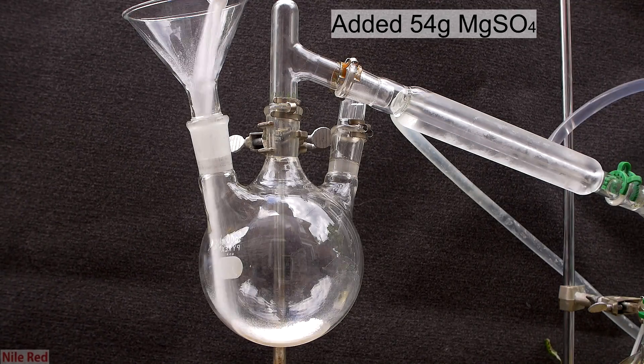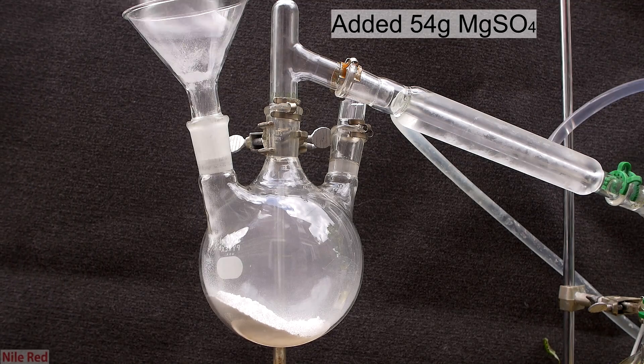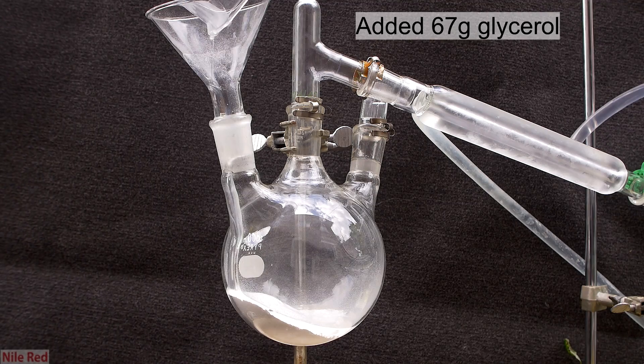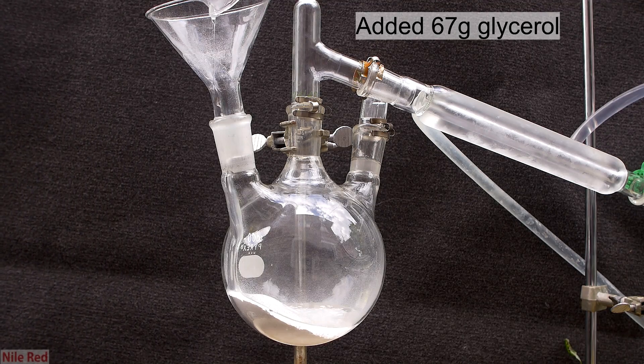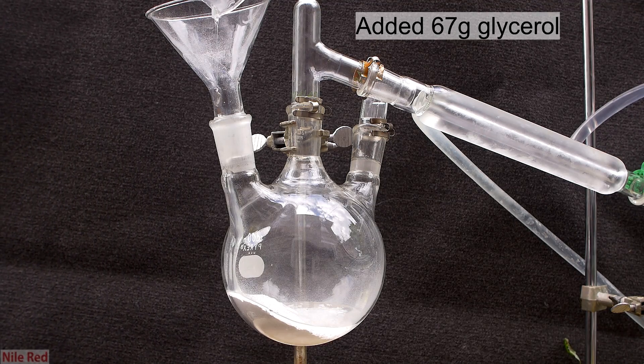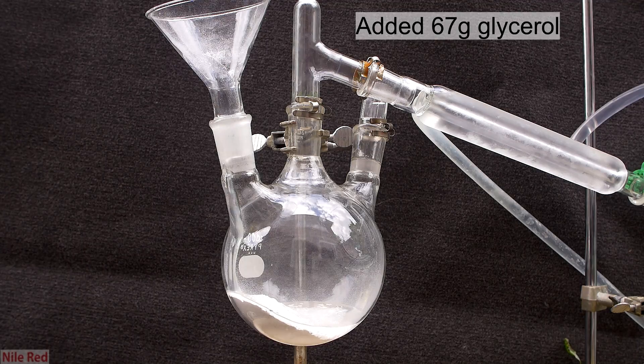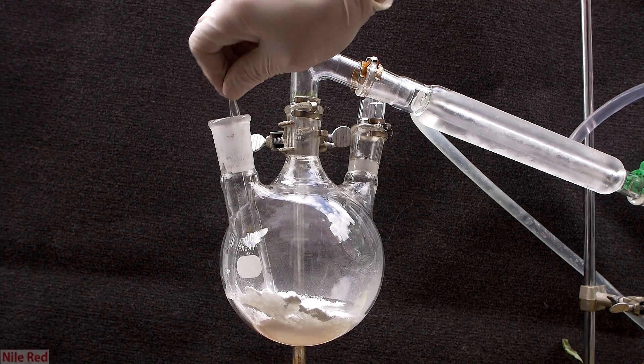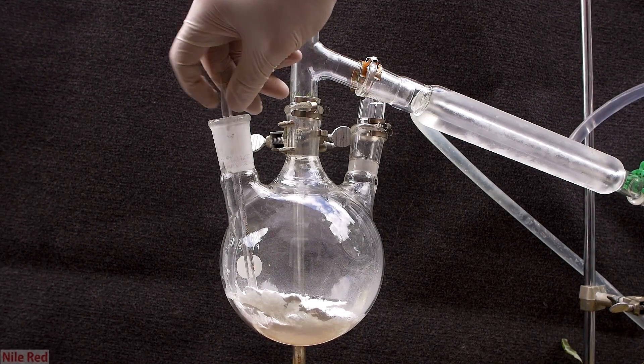To start things off, I added about 54 grams of the powdered magnesium sulfate. On top of the magnesium sulfate, I poured in about 67 grams of glycerol, and in hindsight, I probably should have done this the other way around. Since I added the powder first, the glycerol kind of just sat on top, and I need to use a glass stir rod to mix things around.